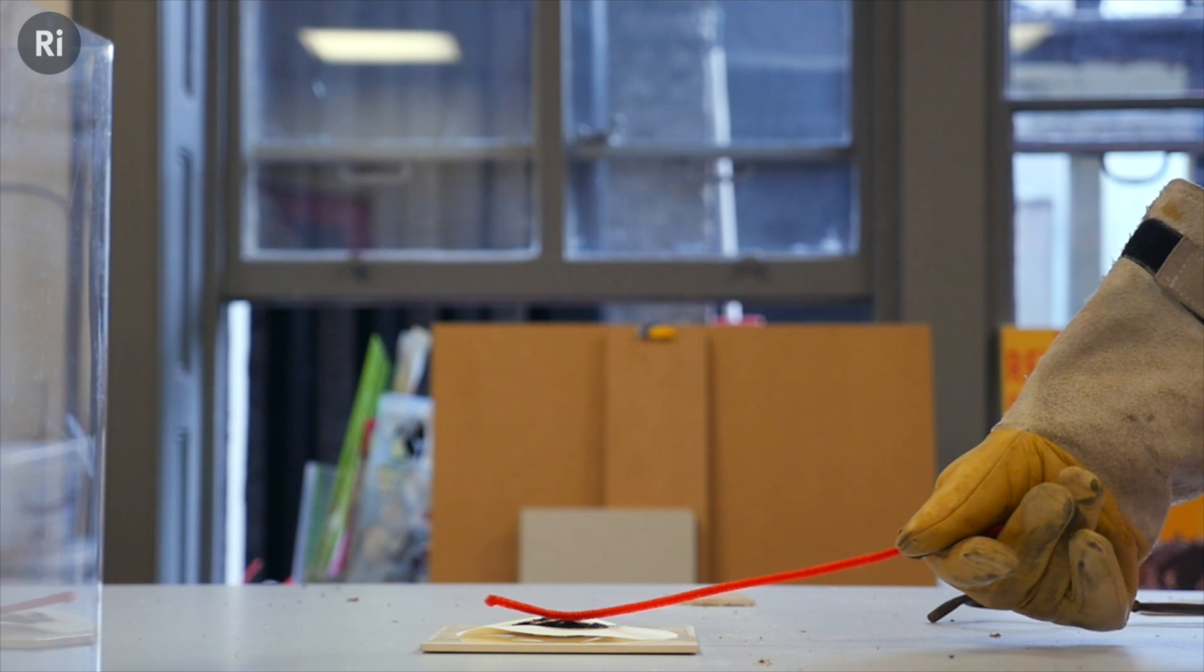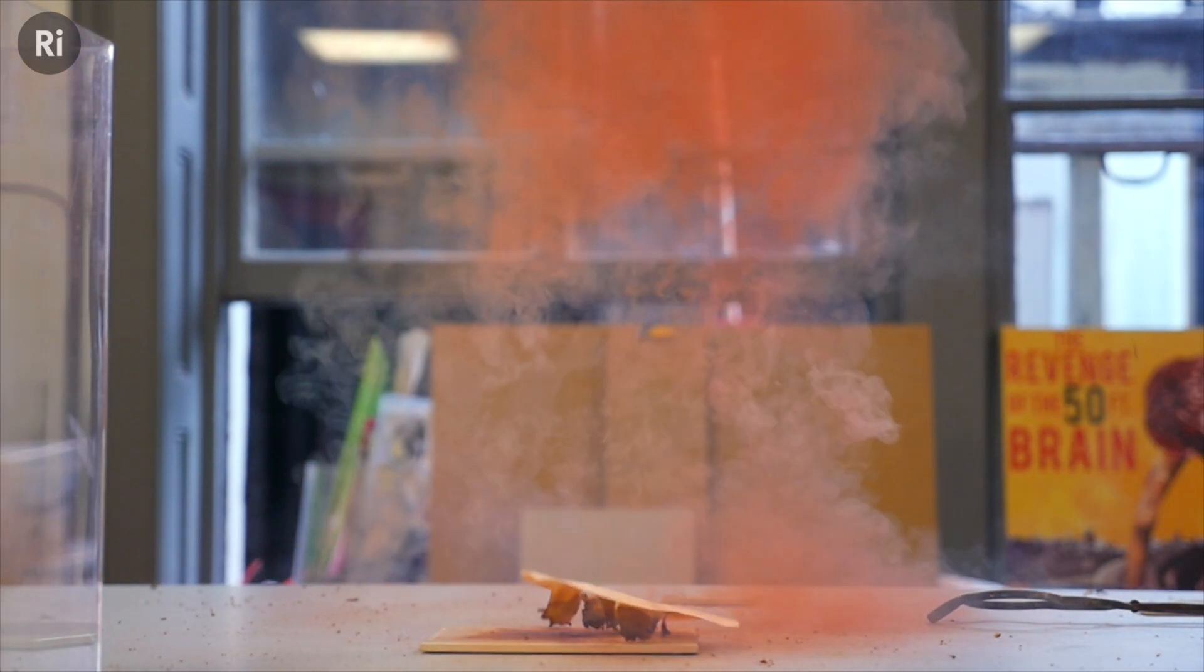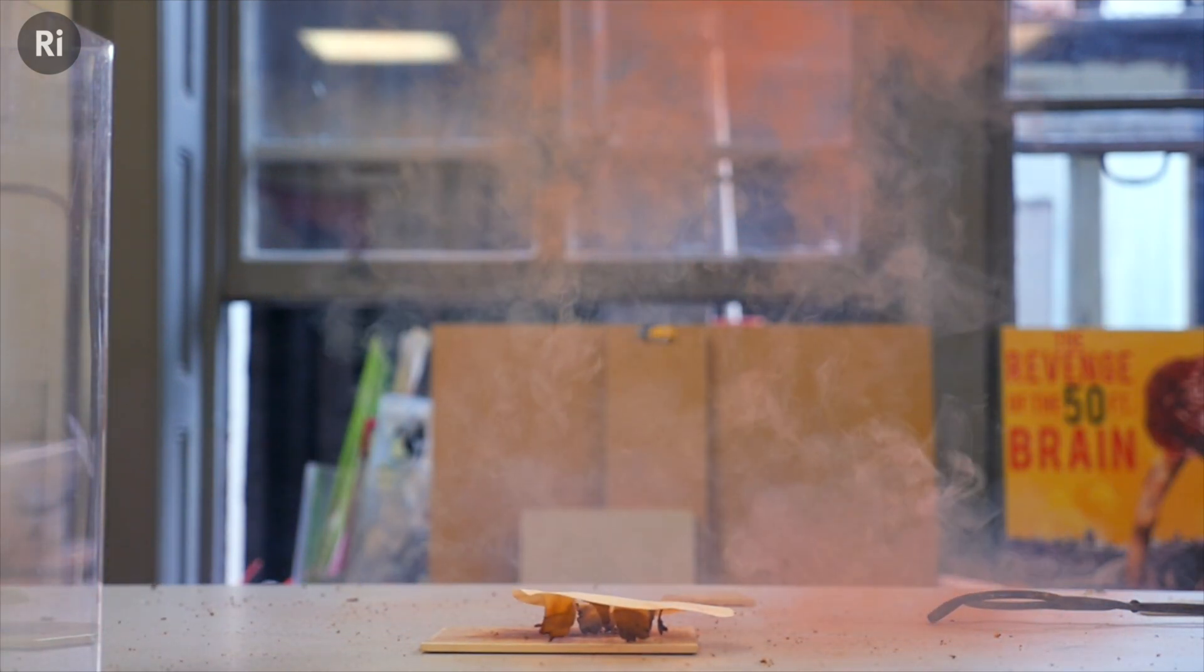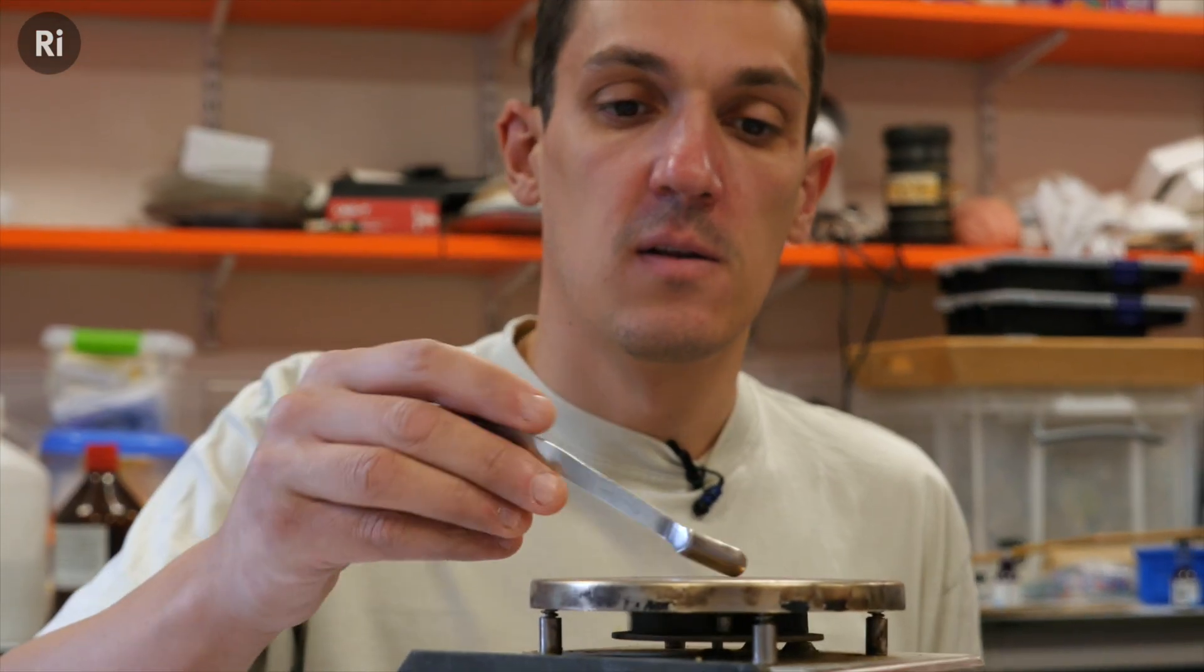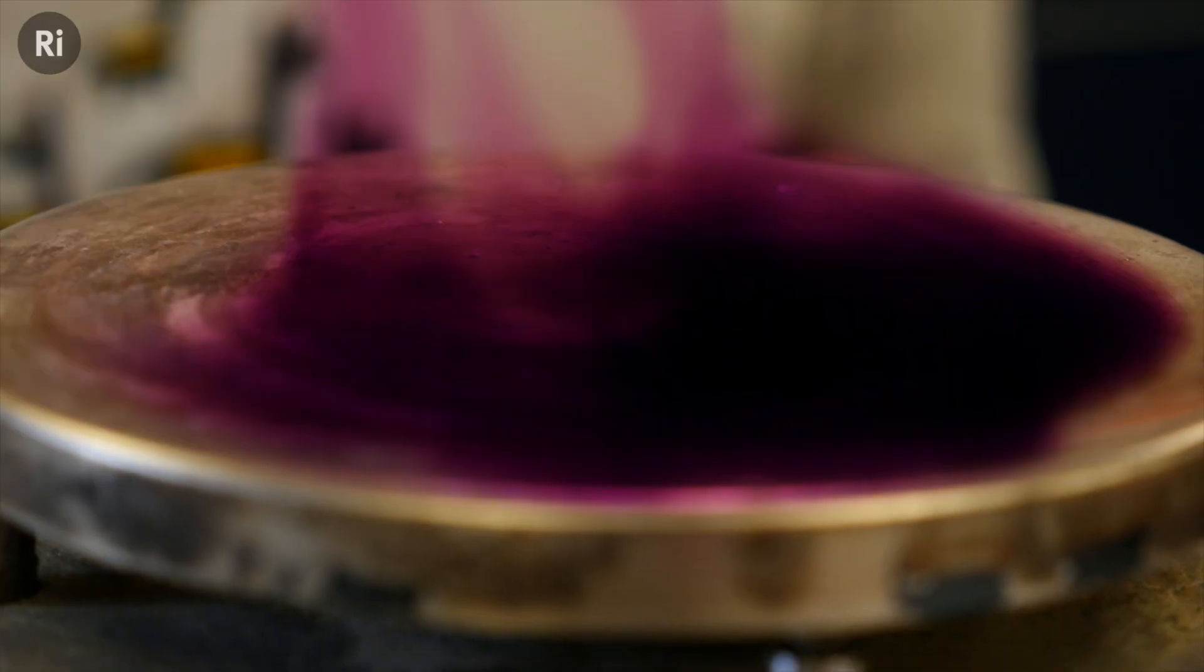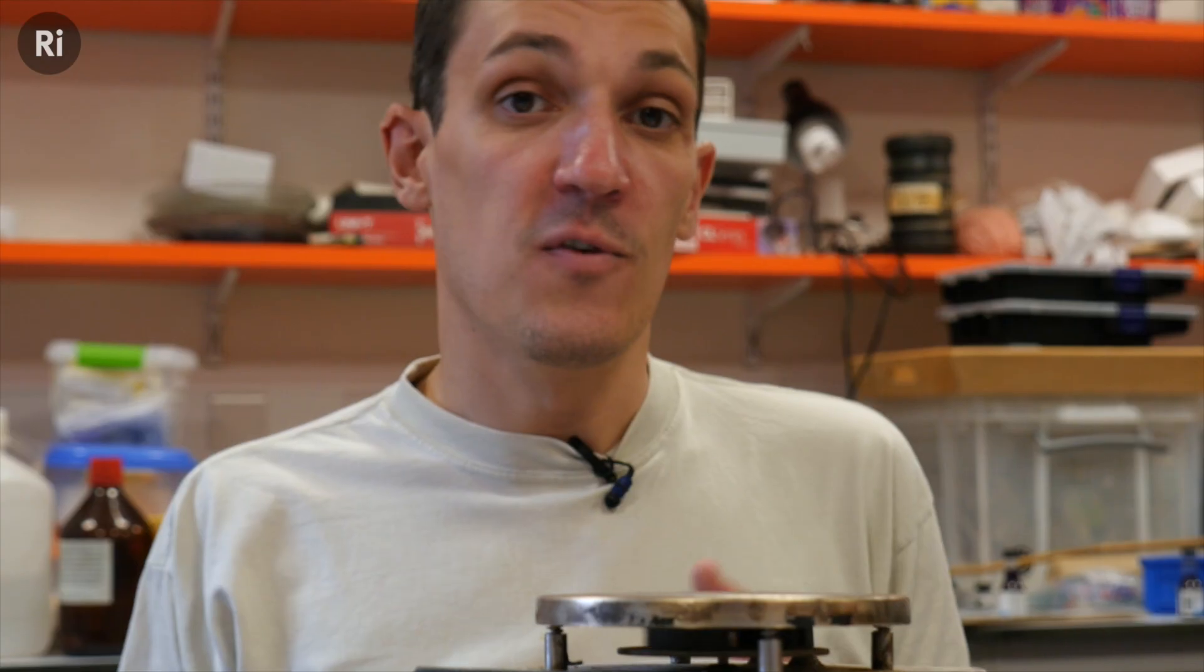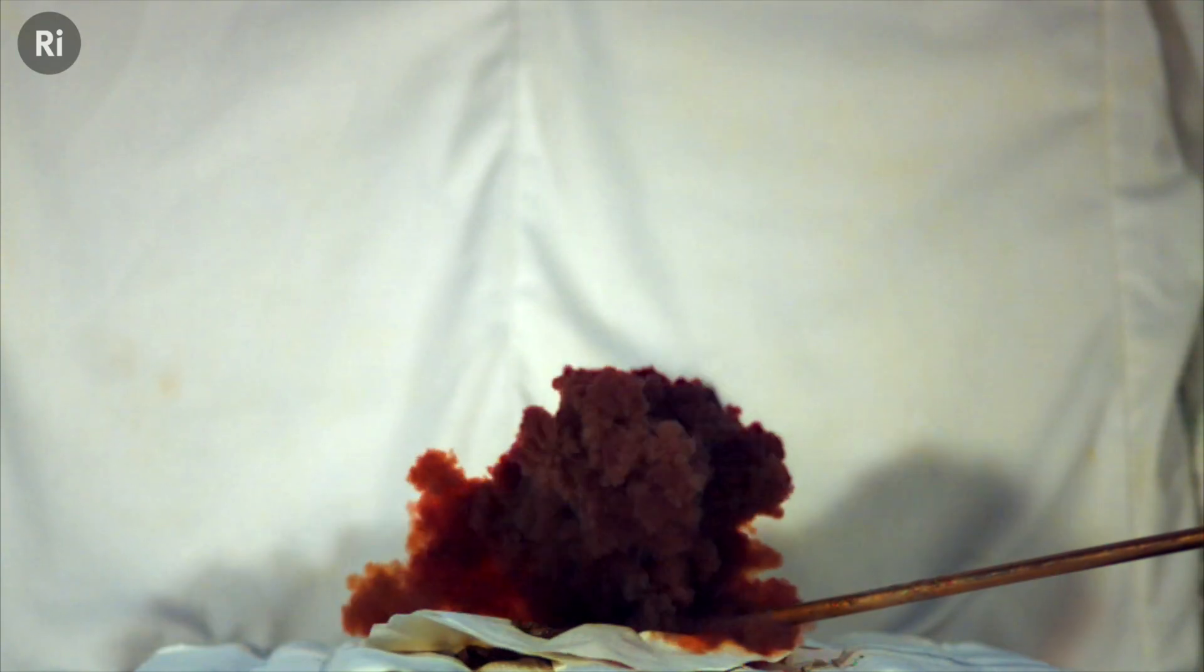One of the characteristic products of this reaction is this beautiful plume of purple iodine gas. And you can see this again if I chuck this tiny piece of solid iodine onto this hot plate. Now this iodine is formed along with nitrogen gas as a result of all those triiodide molecules falling to pieces and recombining into a different arrangement.